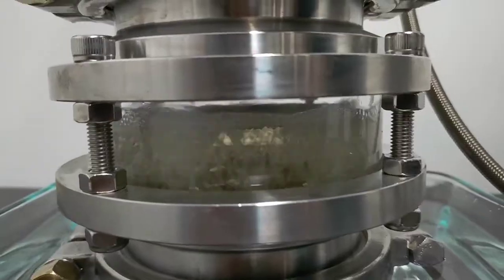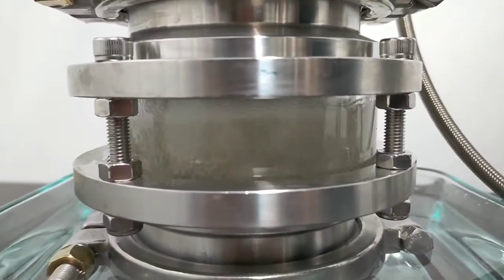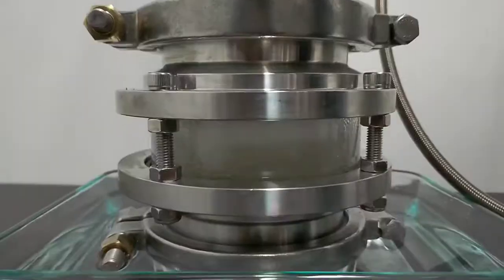As the solution evaporates, monitor your dry ice and hot water bath, and allow the solution to boil.